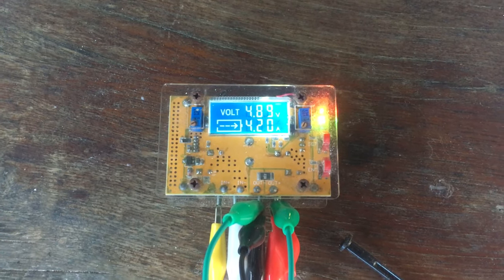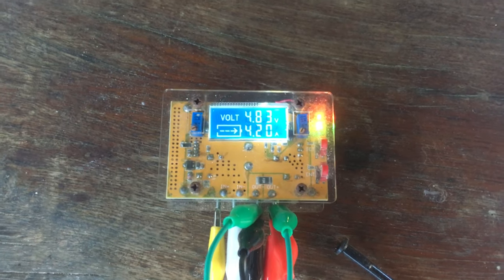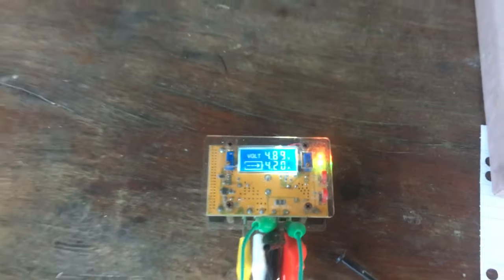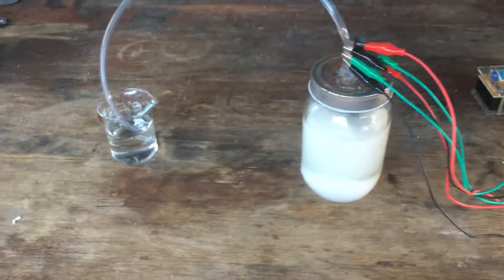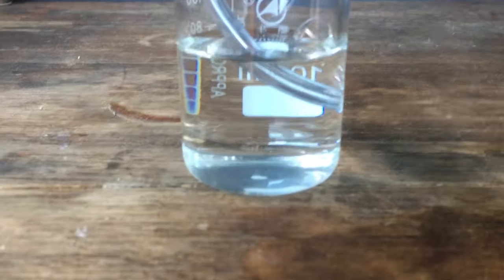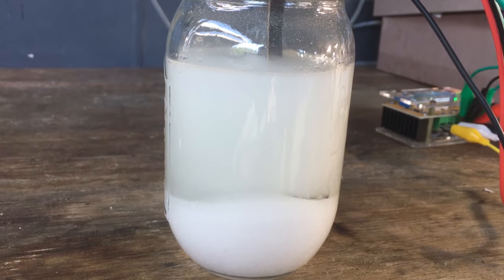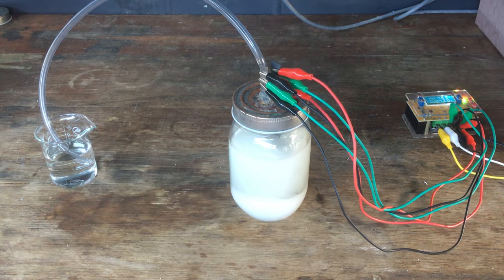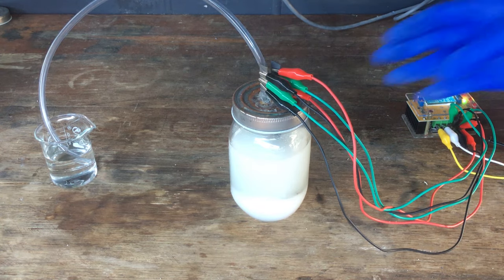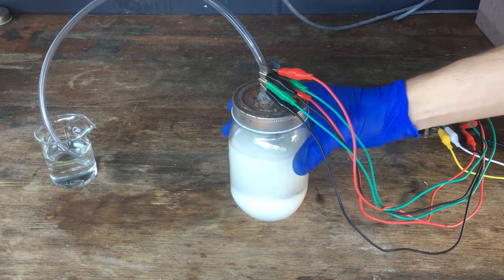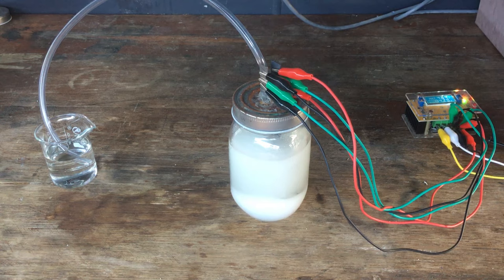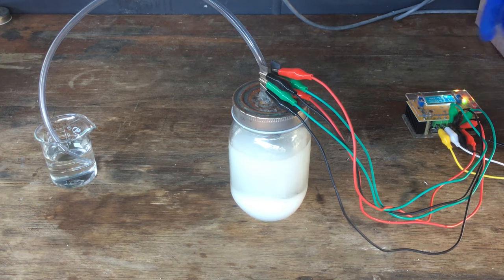Alright, around 4.85, 4.8 volts and 4.2 amps. We can see the cell is still running nicely. We have a whole bunch more gas generation and our cell is completely opaque. So what I'm going to do is monitor this for an hour or two, make sure nothing gets too hot. We don't want the cell to get too hot because that's bad for our electrodes and we definitely don't want our connections getting too hot.